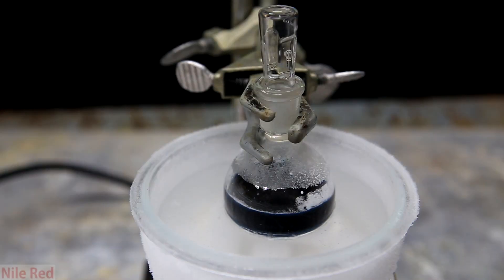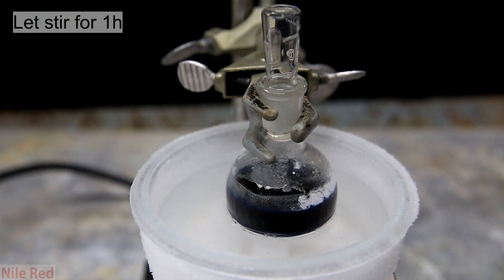Eventually though a point will be reached where the blue color does not disappear. After the final addition of lithium I let it stir for about an hour.